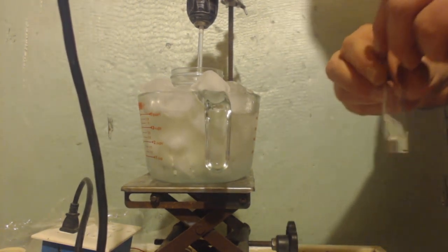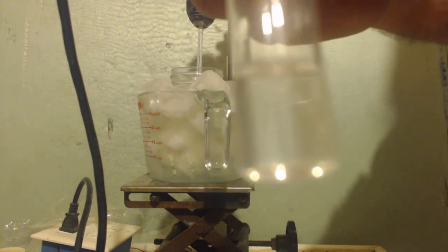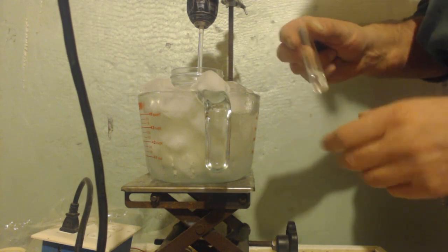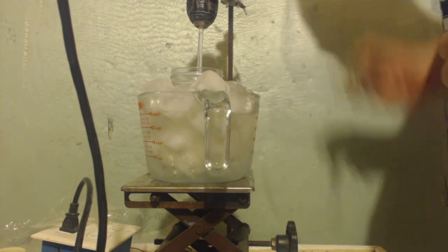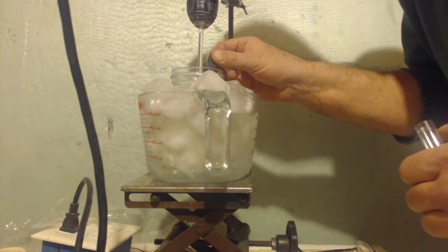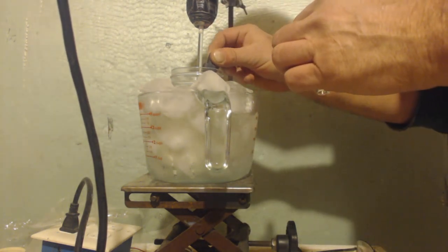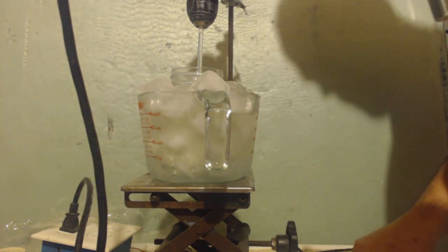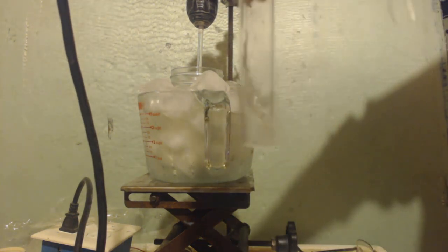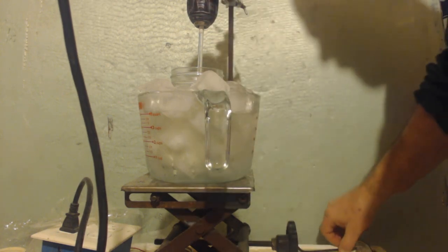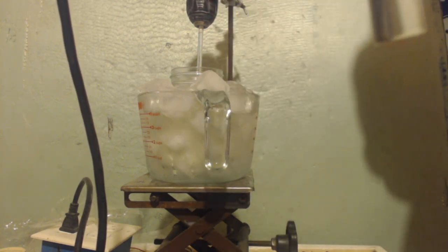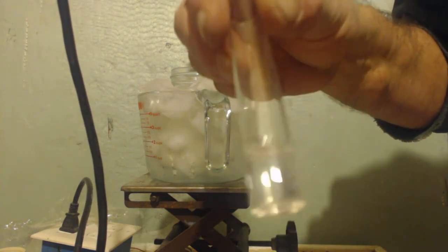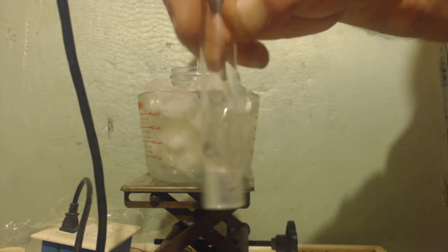So I have some ethanol, it's azeotropic ethanol, and it's a silver nitrate, not nitrite, nitrate. You can see it's soluble. I'm going to take a little sample here and I'm going to put it inside here. Now I'm going to shake it around and see if anything precipitates. Now if something precipitates out, you're making the ester and that's what's precipitating out, I think.